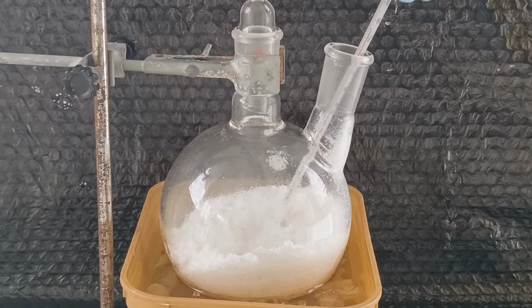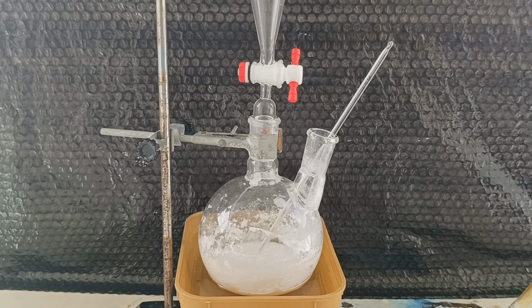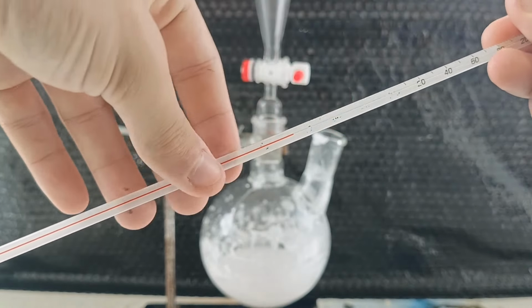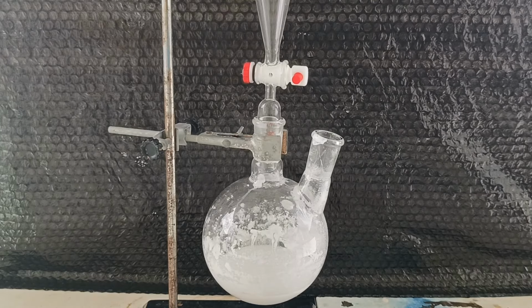with the acetate. Eventually, all the acetyl chloride had been dripped into the round bottom flask, and at this point I closed the valve. Unfortunately, the acetic anhydride vapors had destroyed my thermometer and got rid of the markings, making it useless. But oh well.